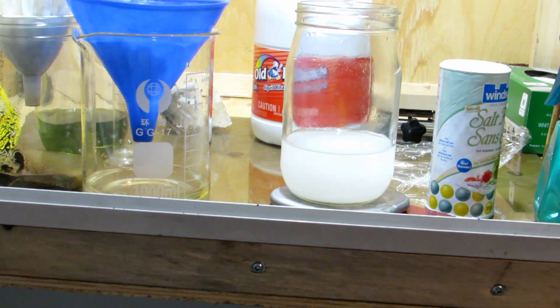So I'm going to filter this directly into this beaker. As it filters in, immediately the double displacement reaction will occur and we will form potassium chlorate, which will hopefully crystallize out of solution as we cool it down. So I'll add this, and as it filters in, that'll be good. And then I'll meet you back.